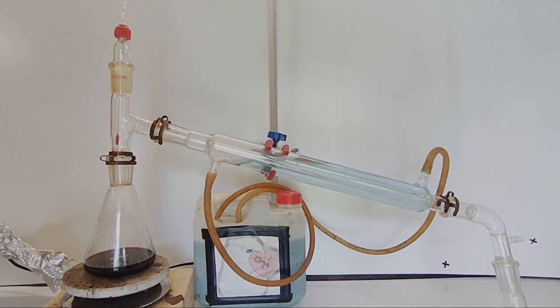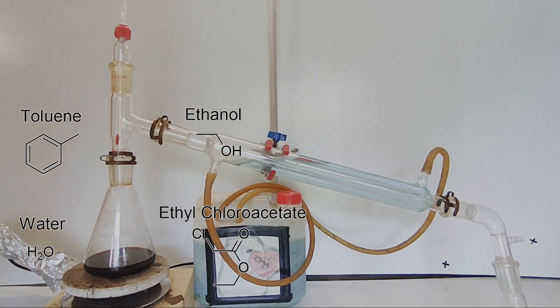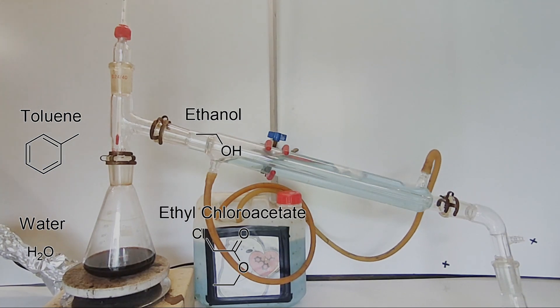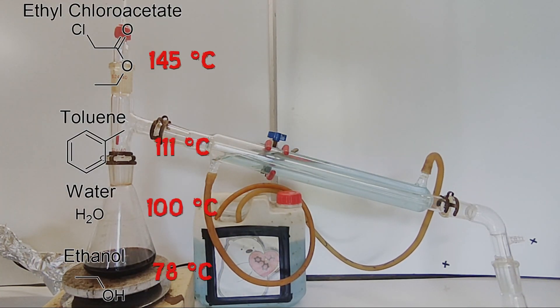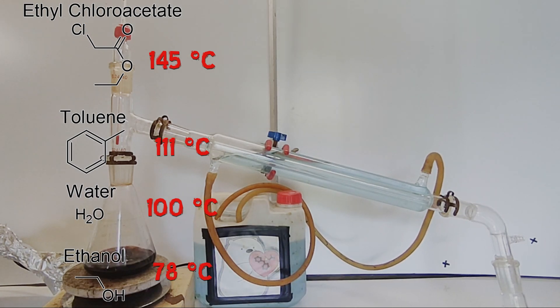These are the volatile compounds remaining in our flask, and these are the boiling points of each of them. As we can see, the boiling point of ethylchloroacetate is by far the highest.